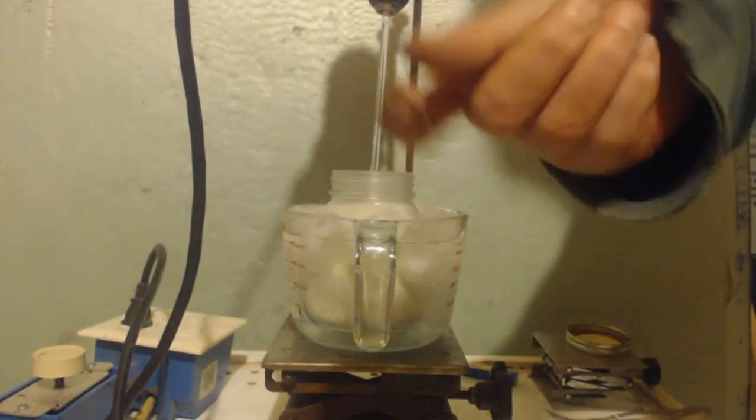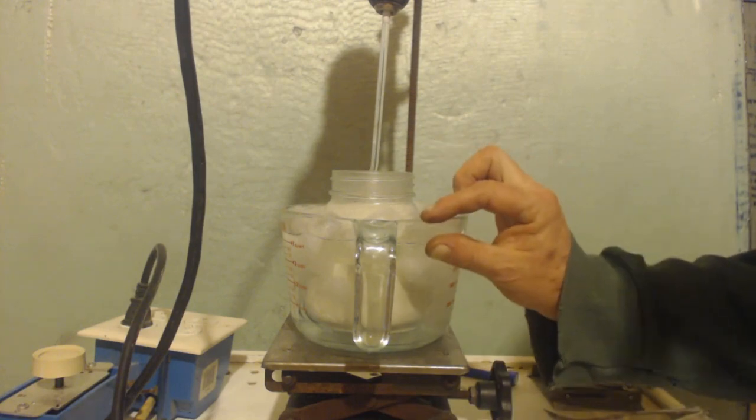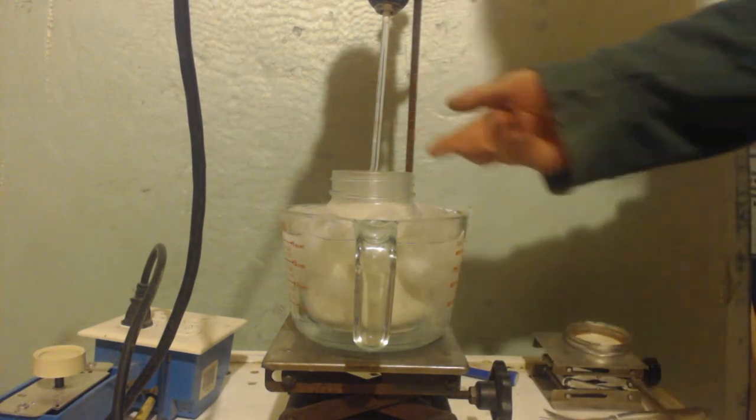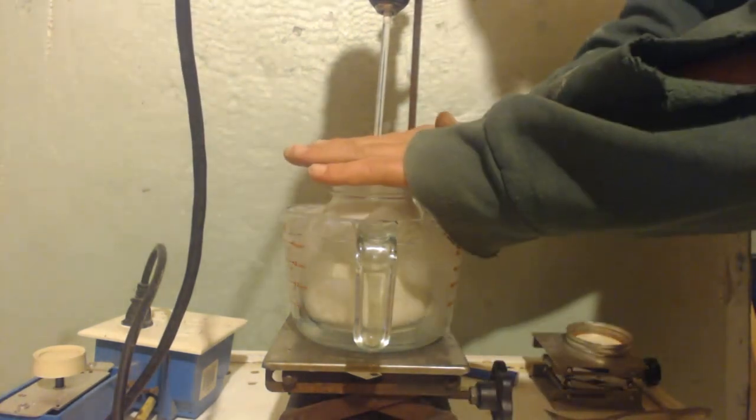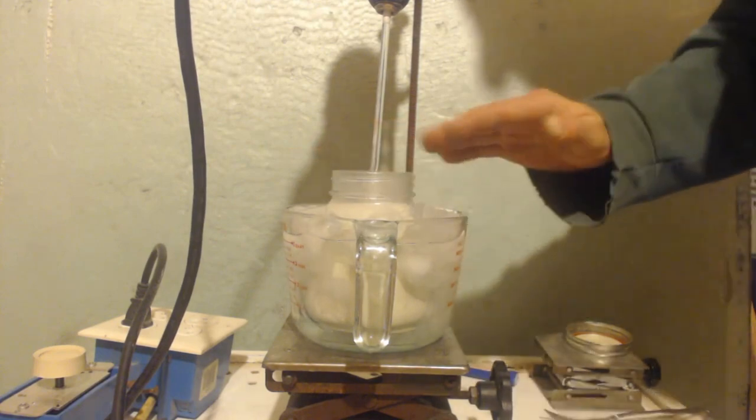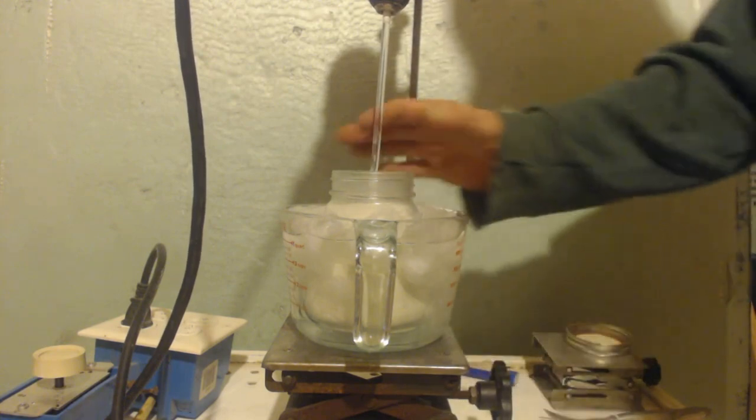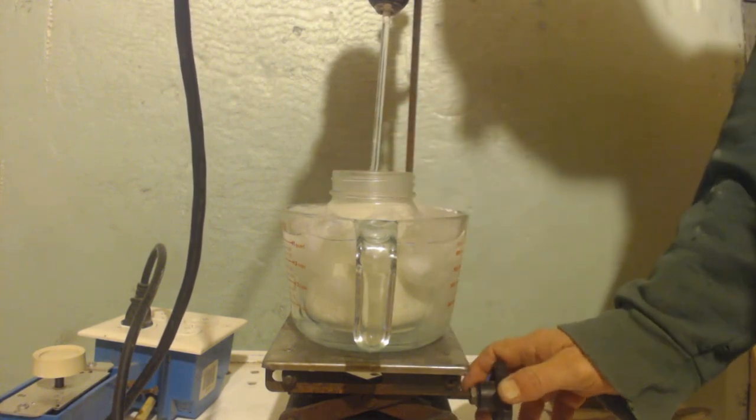Another thing is maybe about that much of the liquid, the diethyl ether, has evaporated because I have this container open. So what I may do is put some cellophane over this to block some of the opening away and hopefully not get the drill bit sucking it up, twisting the cellophane around, leaving a big enough hole for the drill bit.